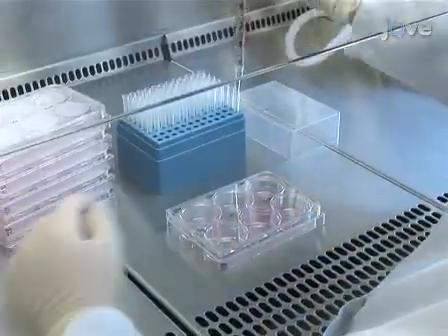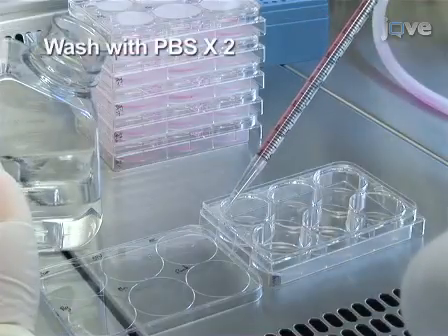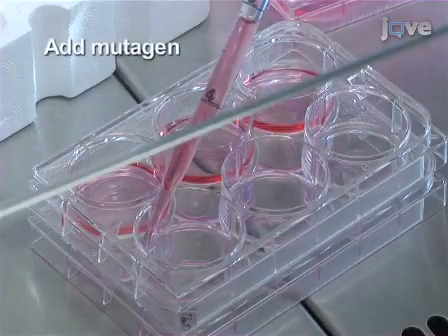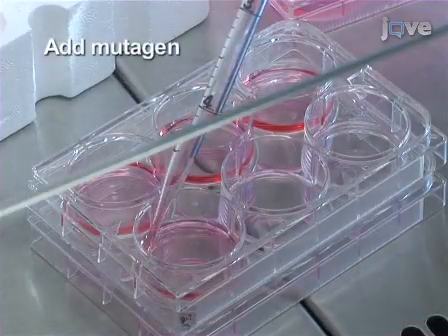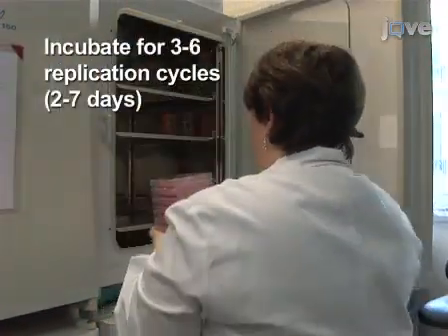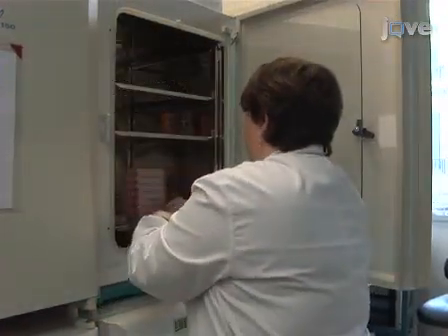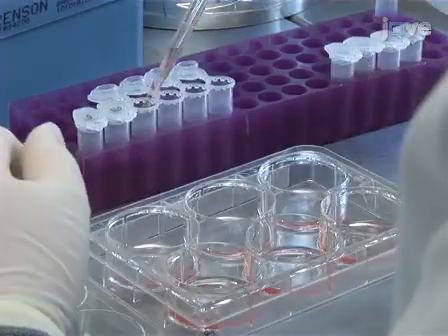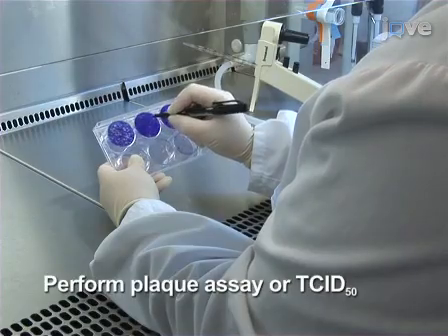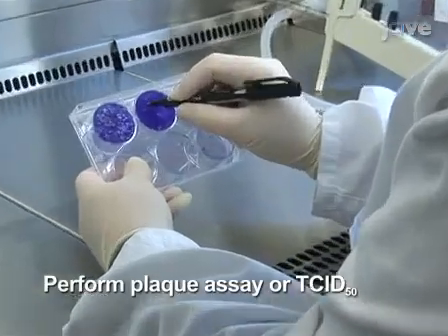Aspirate the inoculated virus and wash twice with 2 ml of PBS to remove as much of the inoculum as possible. Then, add medium with mutagen to each well and incubate cells for the equivalent of 3 to 6 replication cycles, usually 2 to 7 days. Harvest virus from each well and perform a standard plaque assay or limiting dilution to determine the antiviral effect on virus titer.